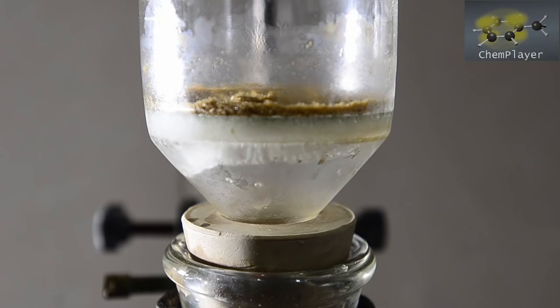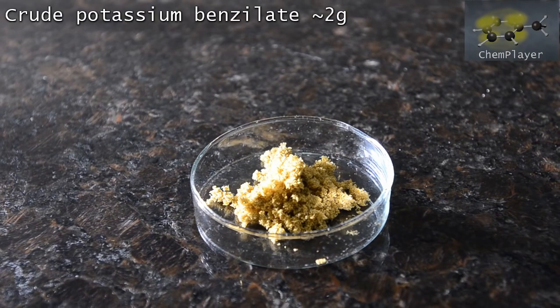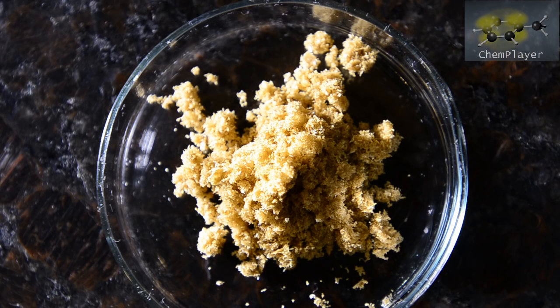And got them nice and dry. Here's our potassium benzilate. It looks a bit like brown sugar. However, there's only about 2 grams here, which isn't a lot, and we were expecting a bit more than this from the reaction. So we decided to process the filtrate that we collected to see if we could get more product.